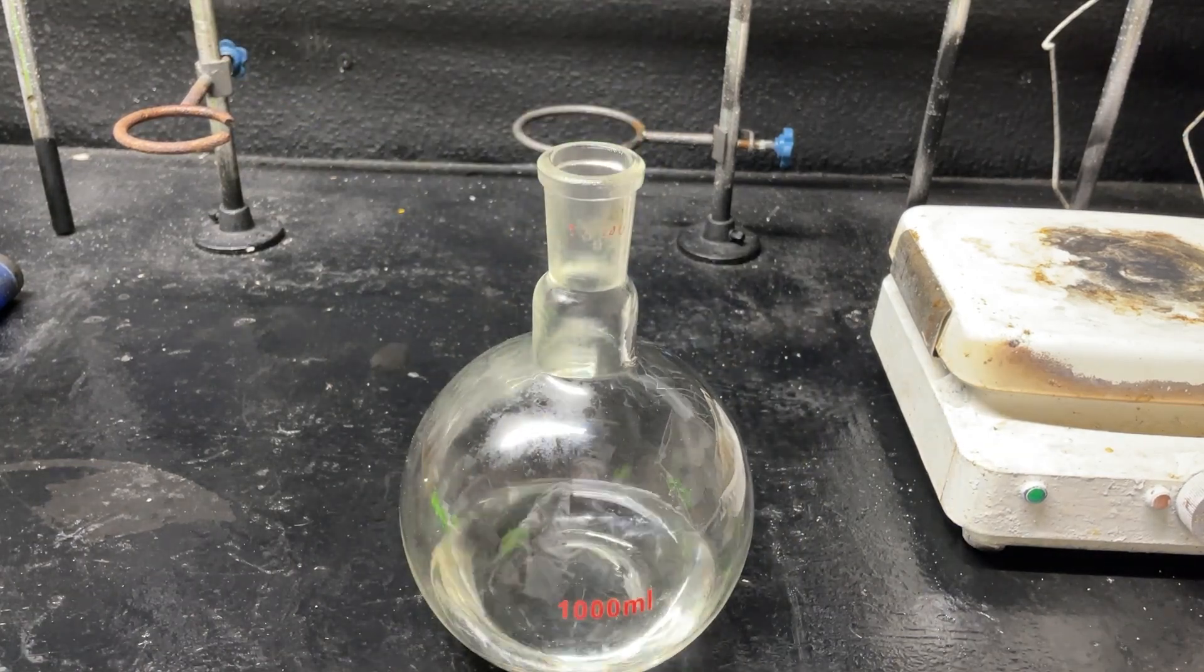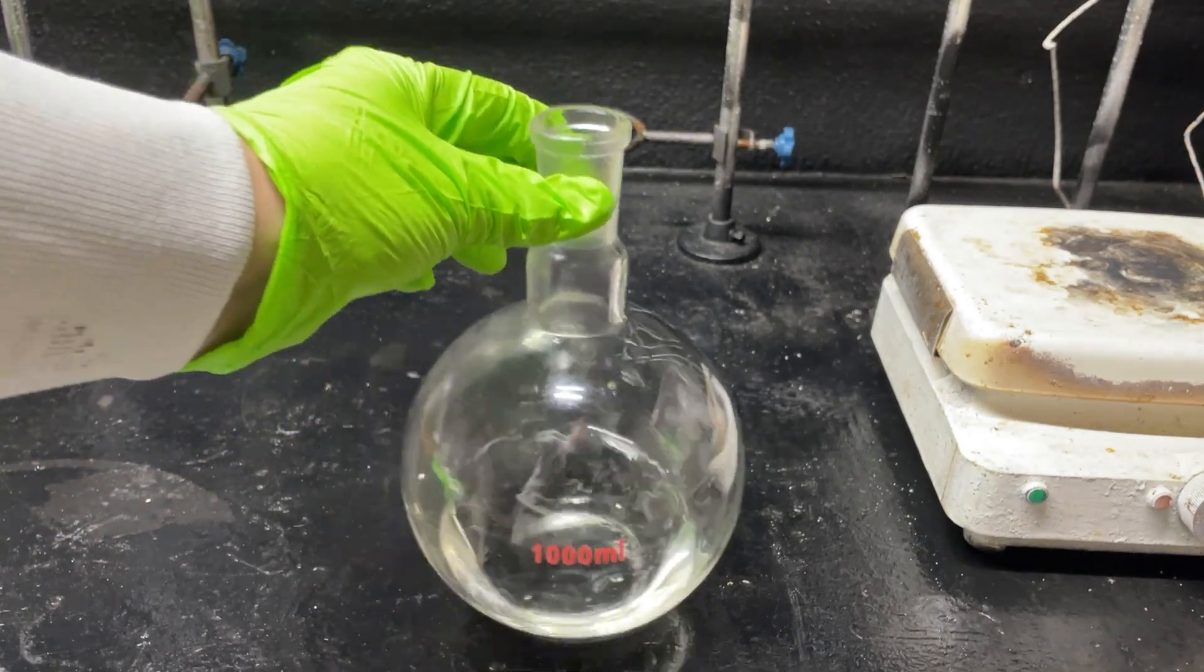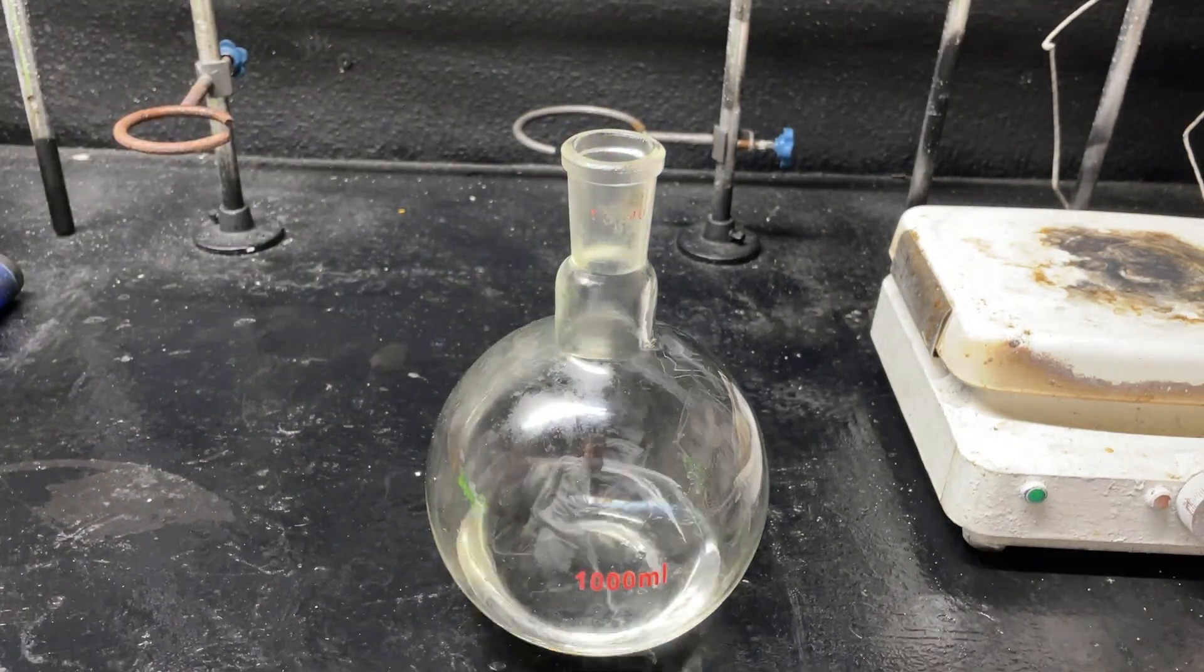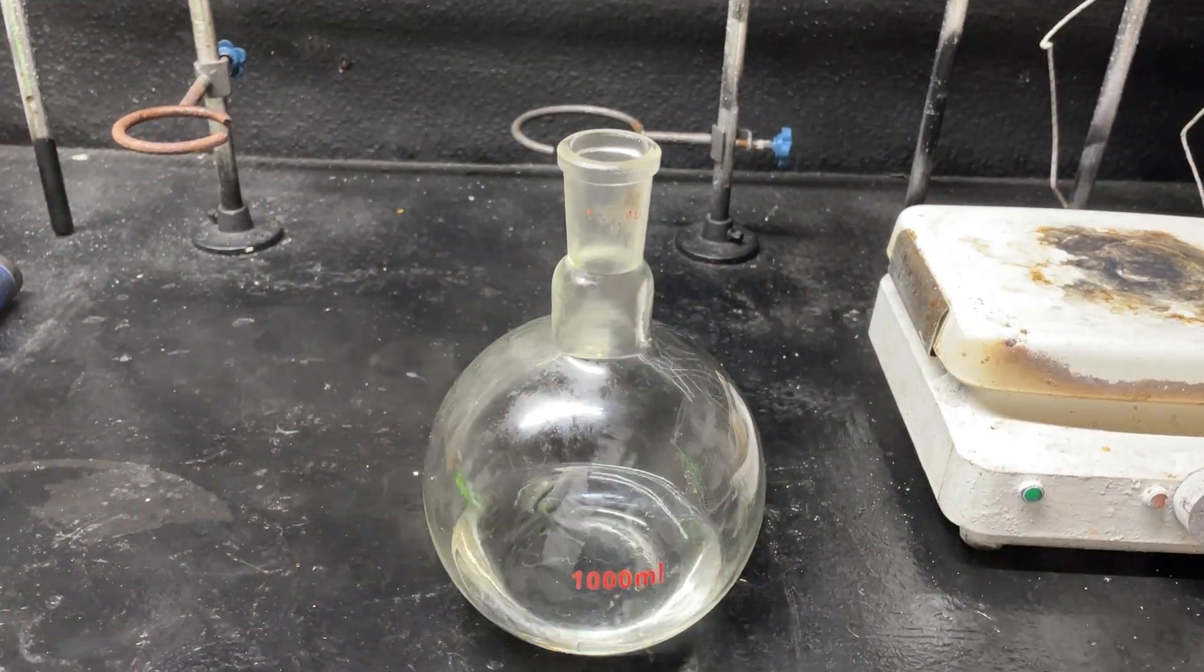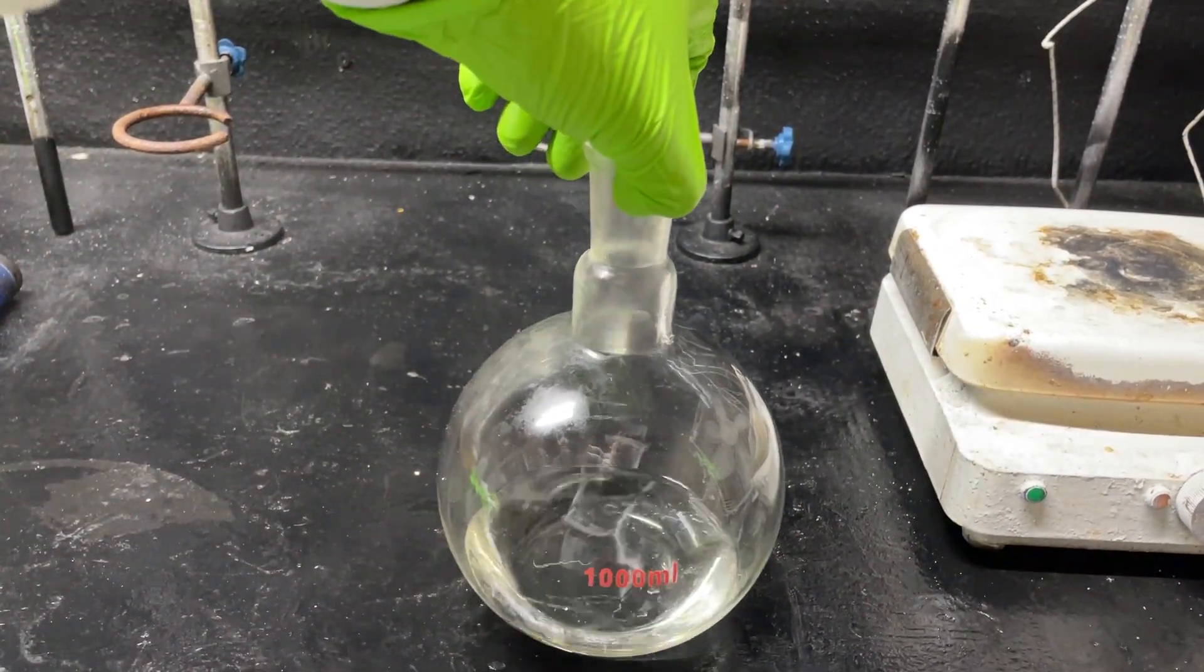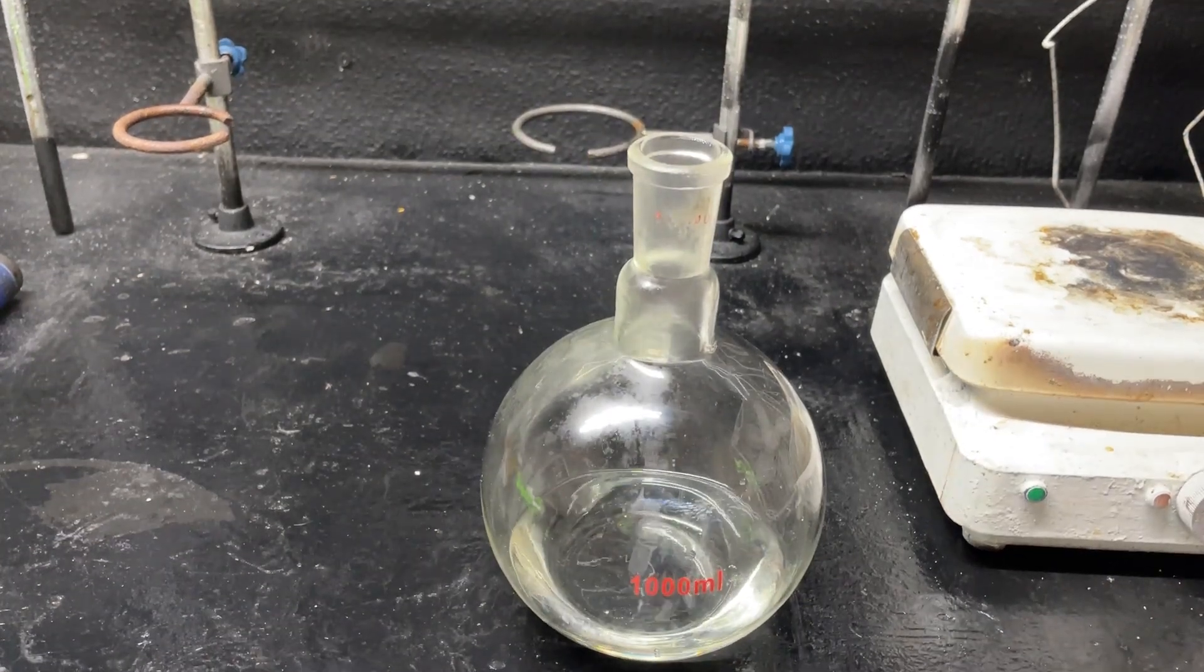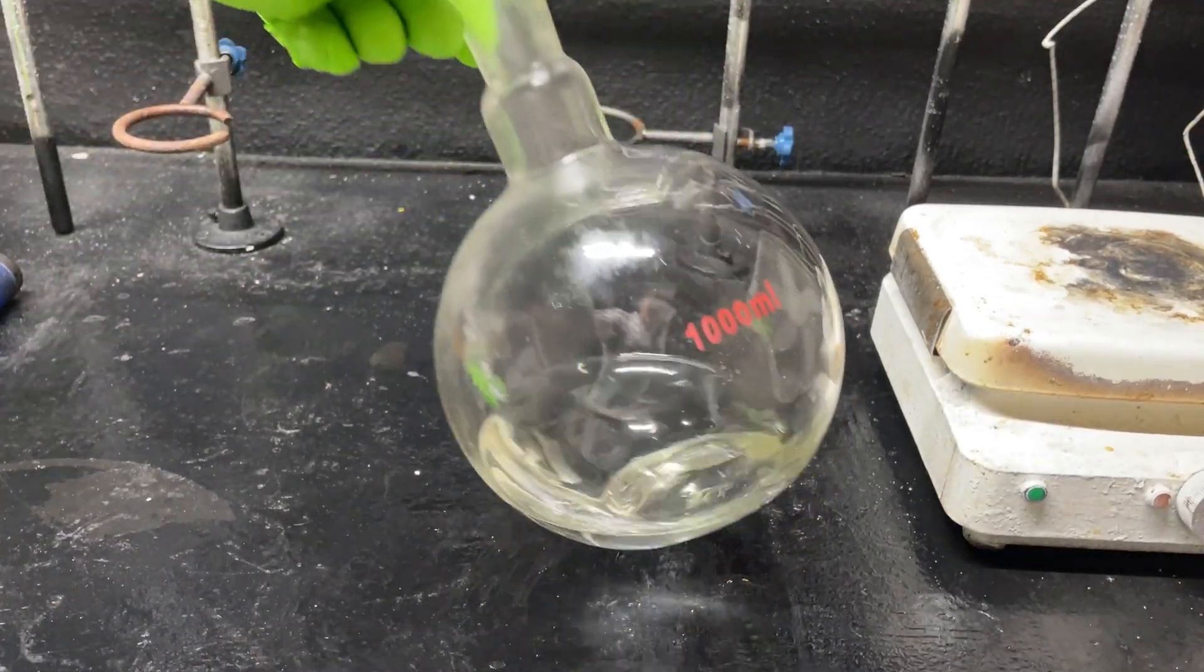Here we got a noticeably kind of more dense oily liquid. Let's see if the reaction works - it should have produced HCl so I'm going to blow some air into it. As you can see there is HCl clearly in it so our reaction did proceed to some extent. So let's do a workup - my eyes aren't singeing yet so that's good.